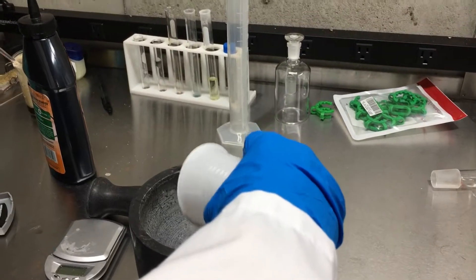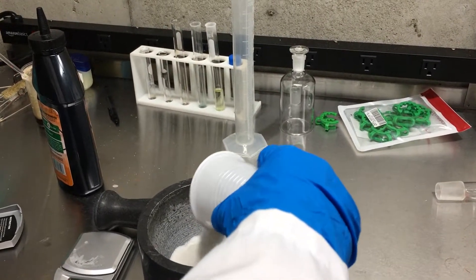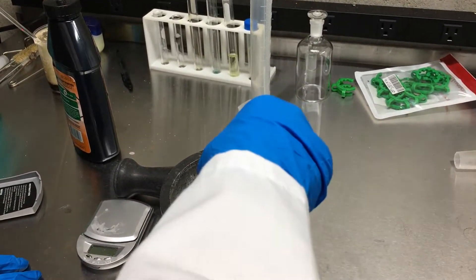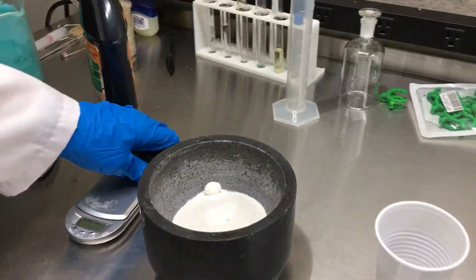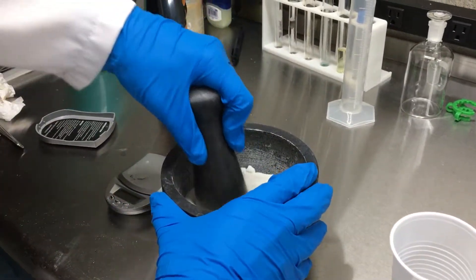For my potassium nitrate I will be using stump remover that I got at the hardware store, and I'm making sure to finely grind it up after measuring out 140 grams.